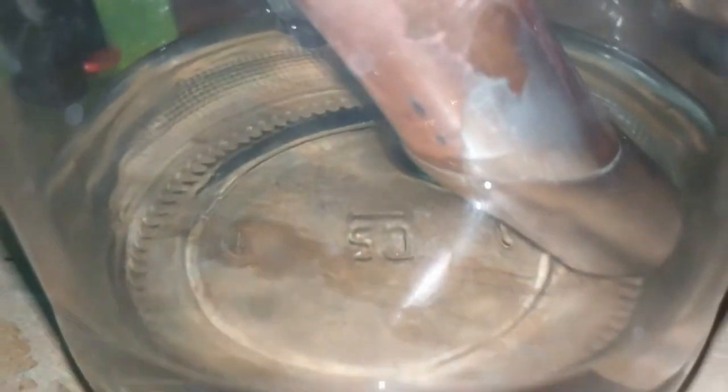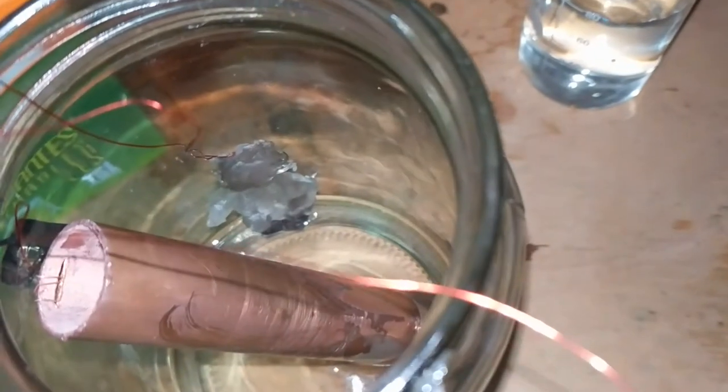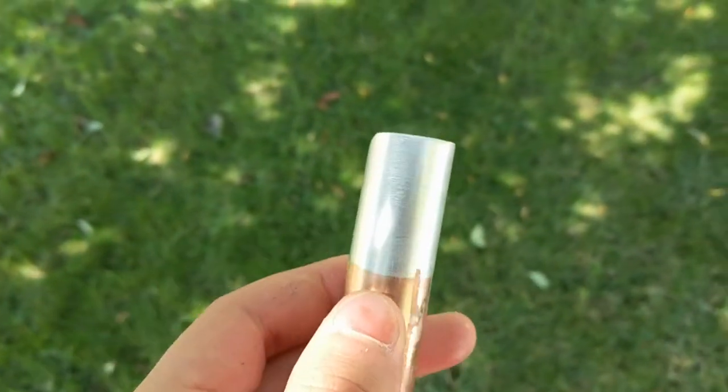It's going to be a silver layer — the question is whether it's growing or just superficial. If you look very closely at the silver anode, you can just about make out — though it's hard to see on camera in this light — very small bubbles being generated. That's a good sign. Let's give it a couple of minutes.